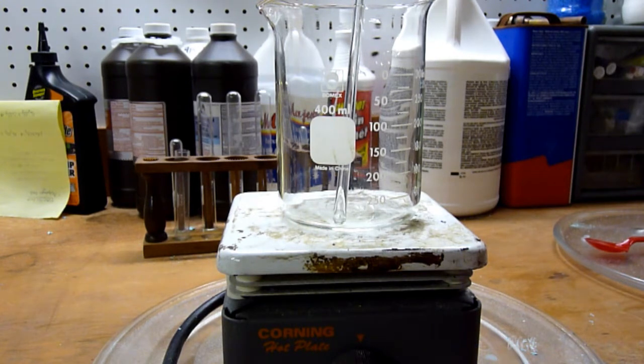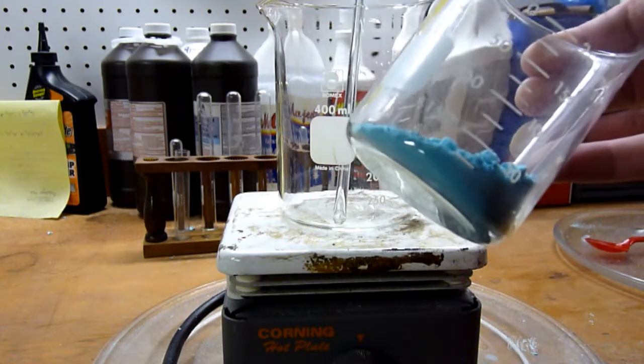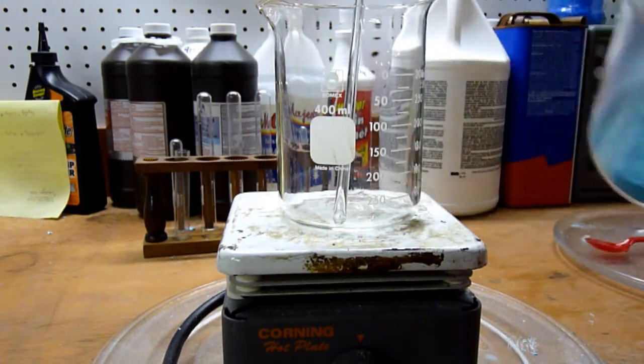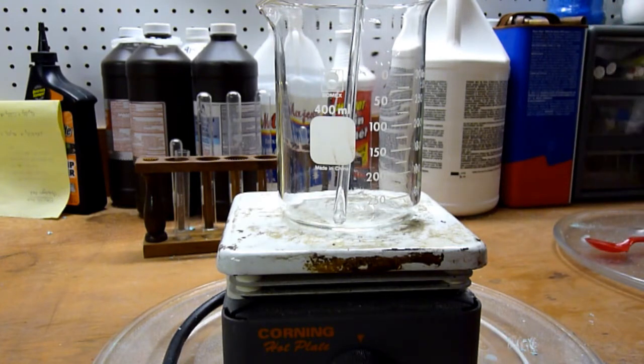So in this video we'll produce copper oxide by heating copper carbonate to over 290 degrees Celsius which is where it decomposes from the carbonate into the oxide with the evolution of carbon dioxide gas. So this will be cool because the color change will be very apparent.